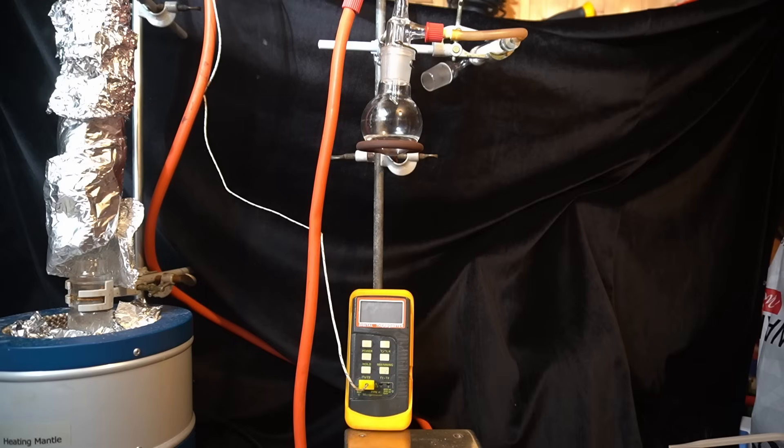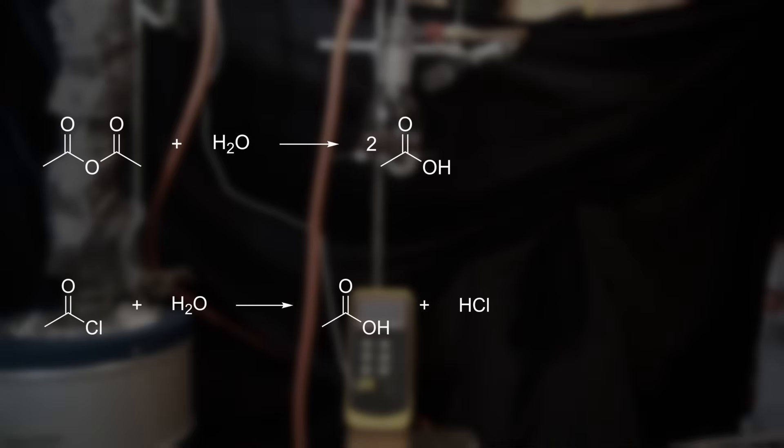The second major difference, and main reason I prefer the anhydride over the chloride, are the byproducts created during reactions. Acetic anhydride releases acetic acid during reactions, which doesn't smell very nice, but otherwise it doesn't do much.